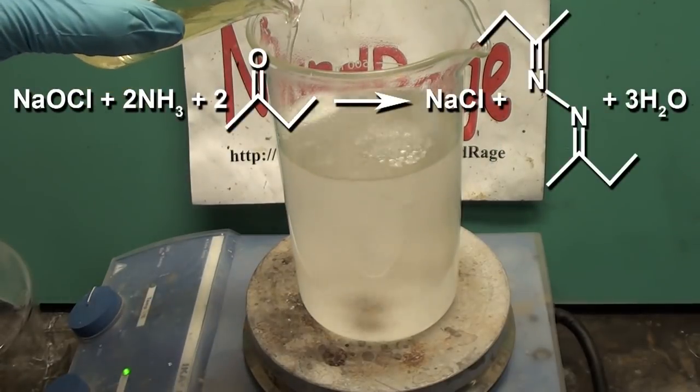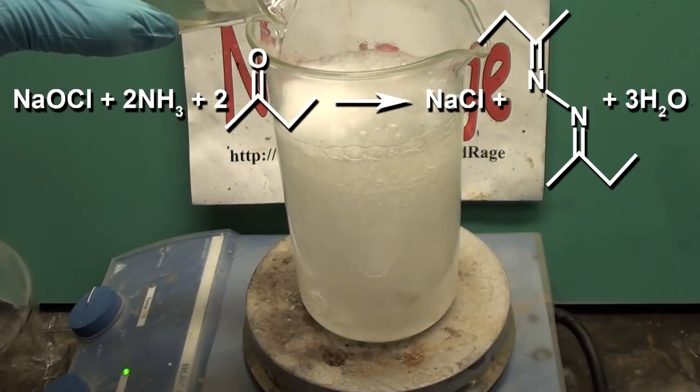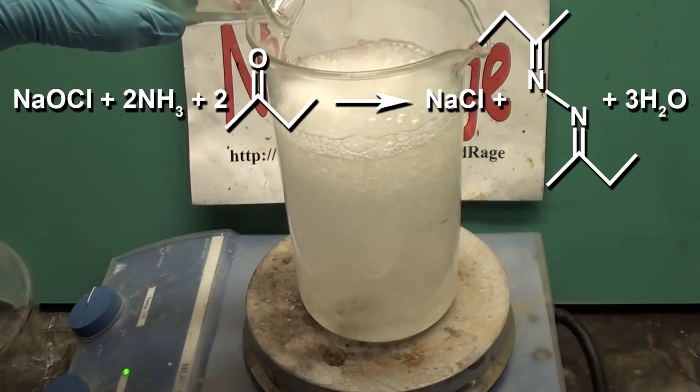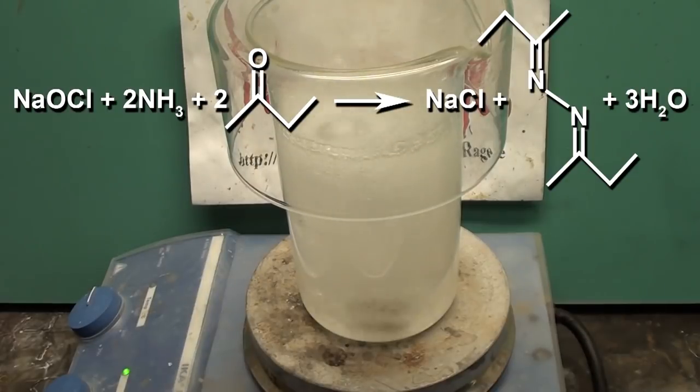What's happening is that sodium hypochlorite bleach is reacting with the ammonia and methyl ethyl ketone to form sodium chloride salt and methyl ethyl ketazine. This actually goes in a multi-step process, but I'm just simplifying it here.